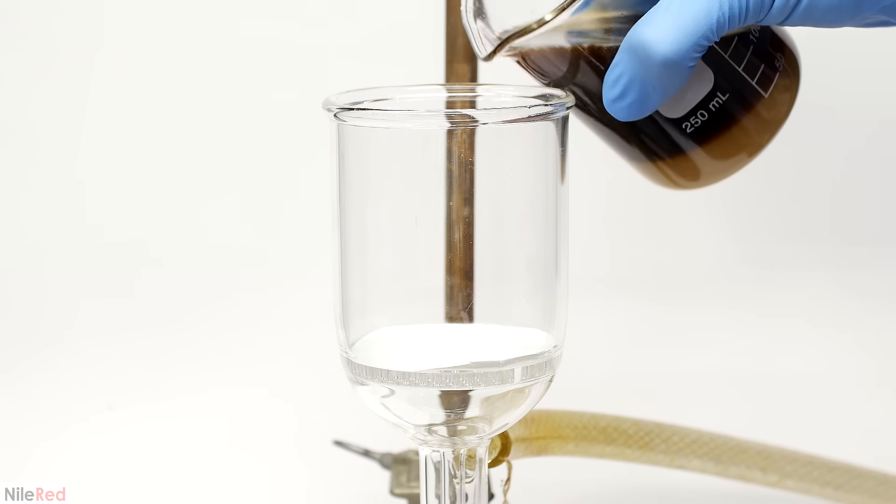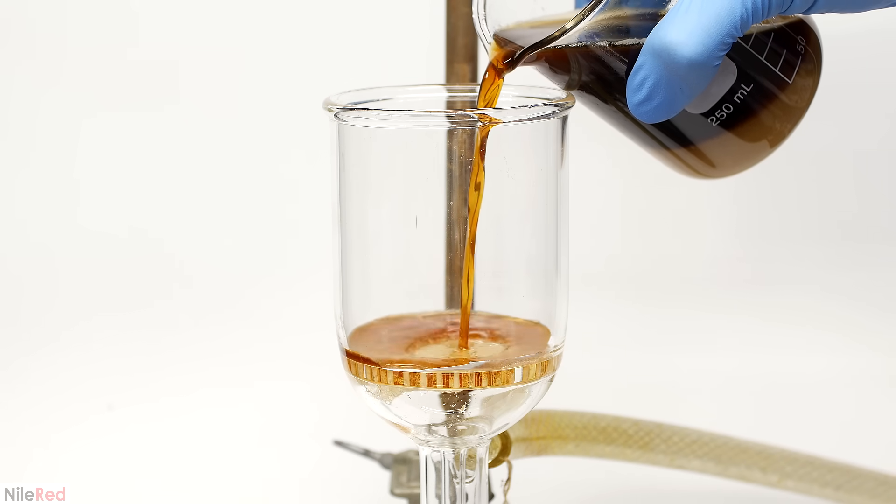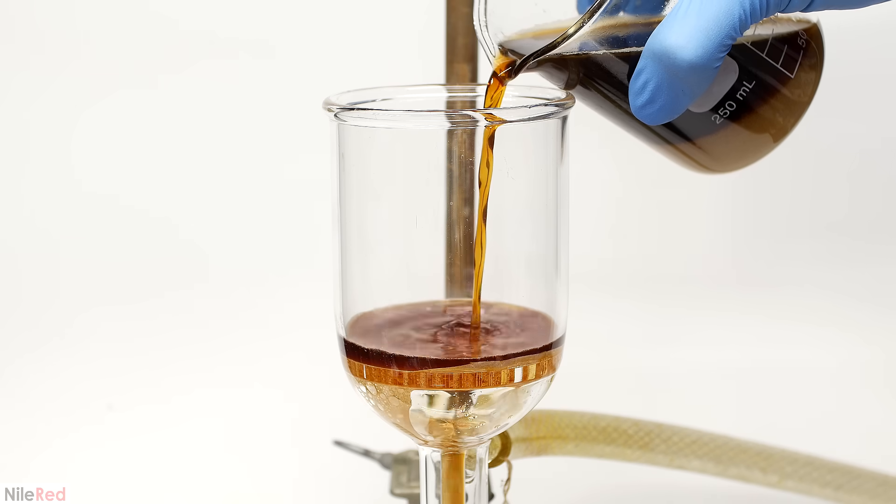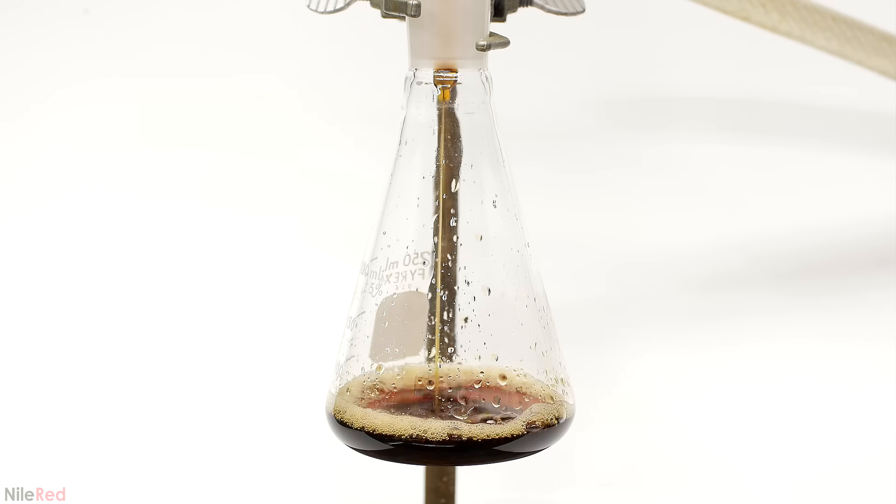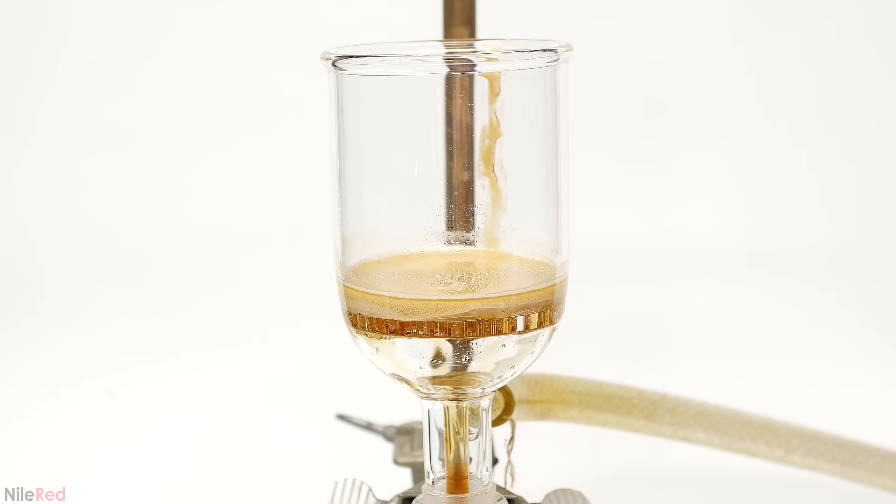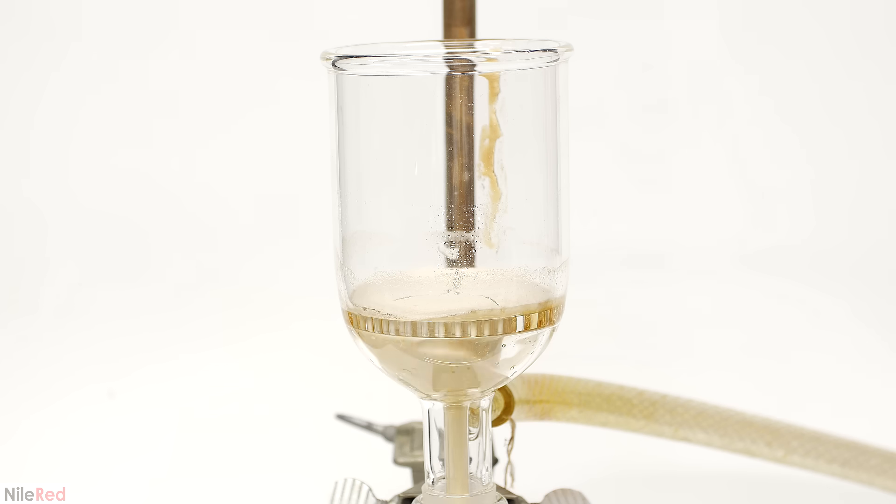When it eventually cooled to room temperature, I vacuum-filtered off the solid stuff. As I mentioned before, this is a mixture of proteins, minerals, and other pee components. I waited for everything to pass through, and then I washed the beaker and the filter with a little bit of water.